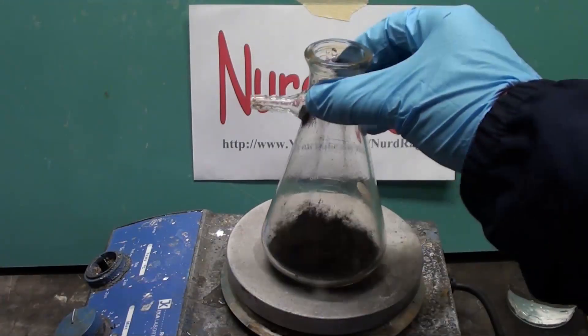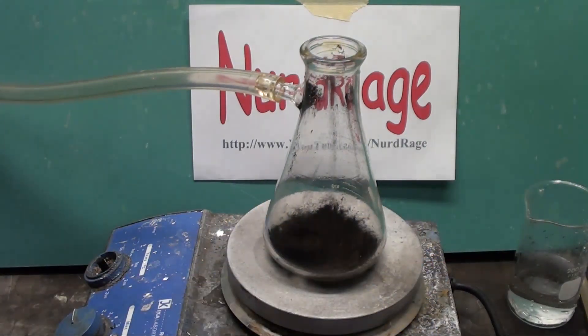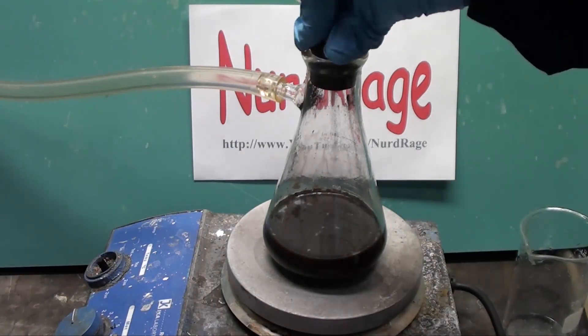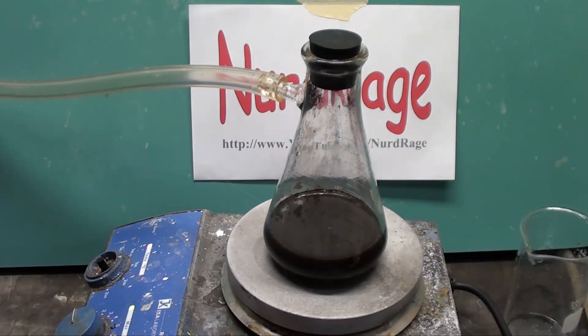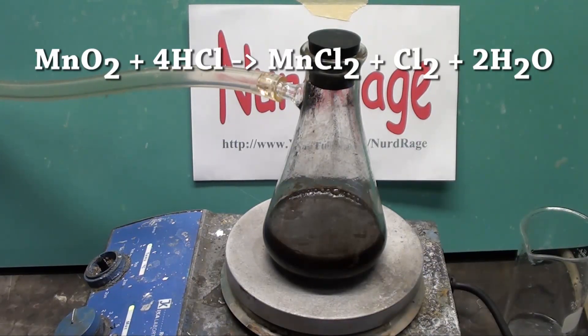Okay, onward. The classic method is to get some manganese dioxide and add at least four mole equivalents of concentrated 12 molar hydrochloric acid. Heating the mixture will drive the reaction to completion. What's happening is the manganese dioxide is oxidizing the chloride ions to form chlorine gas and manganese chloride.